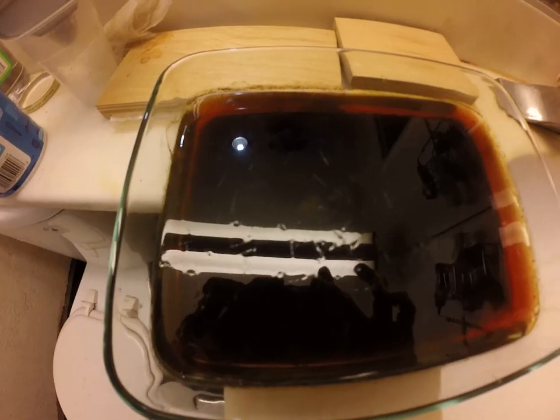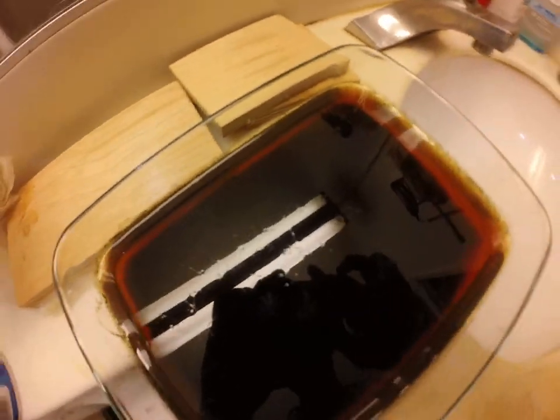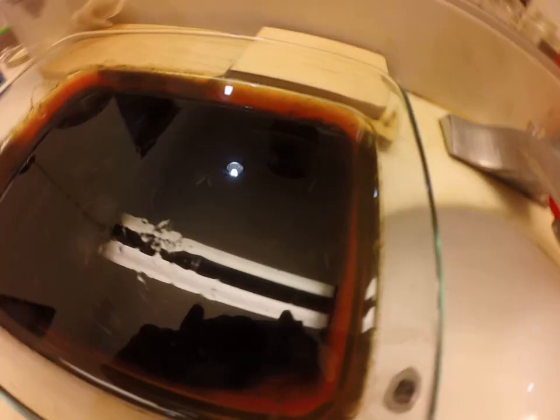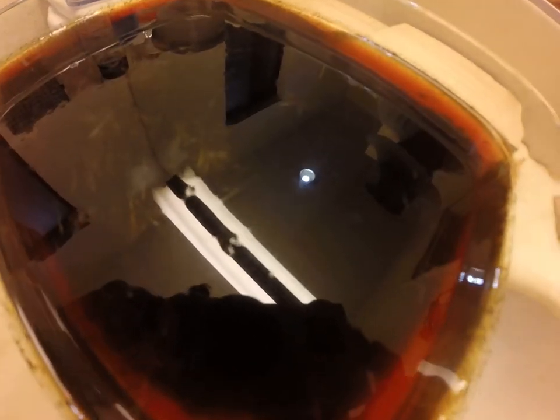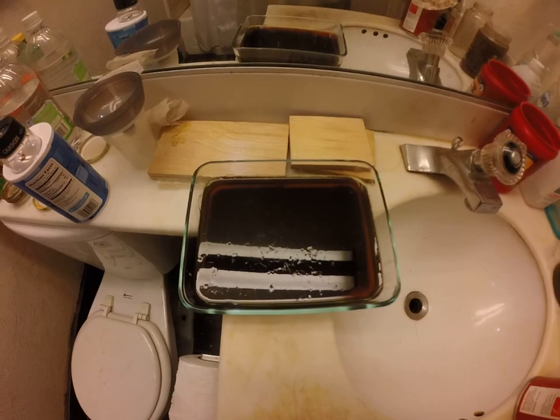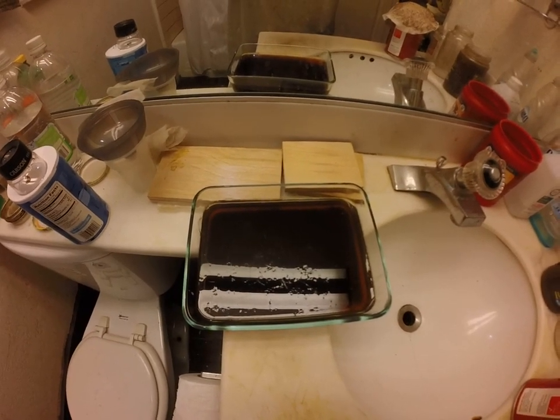Since you're not going to get a time-lapse out of me, I figured I'd at least try to show some of the crystals growing. I might take another peek at this in another hour or two and see what it looks like. But we're on our way — it's working.